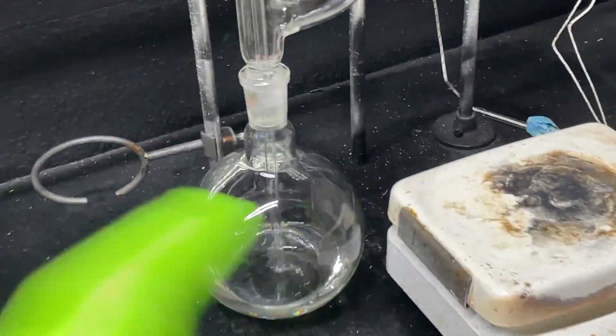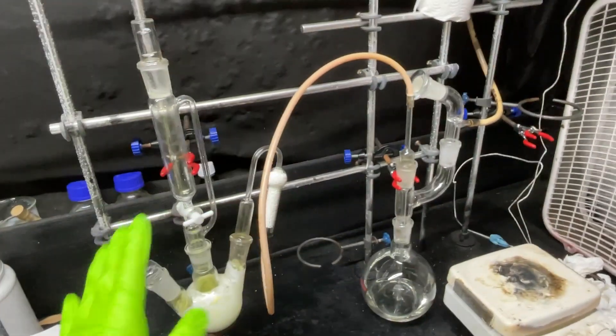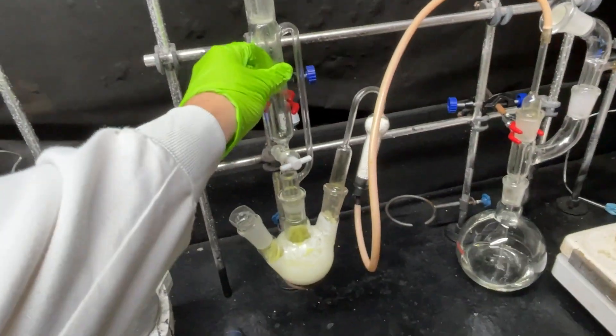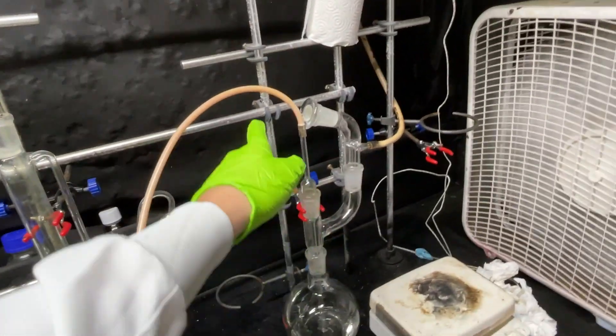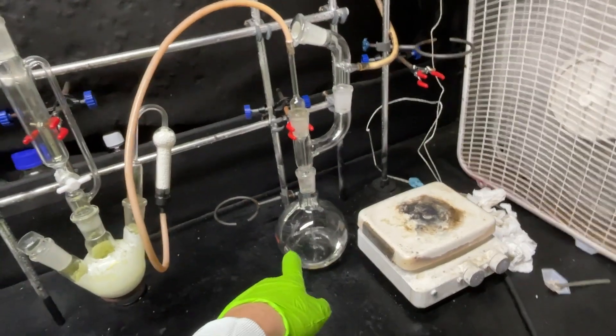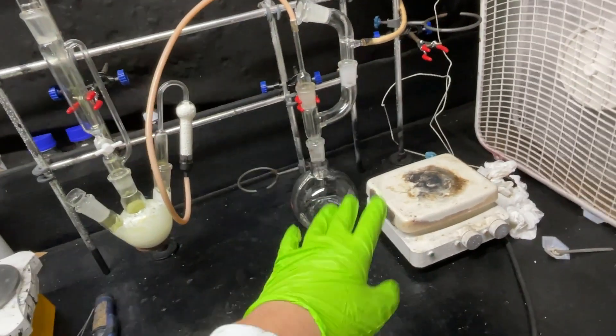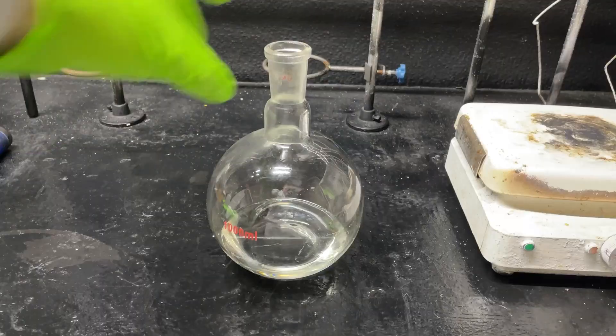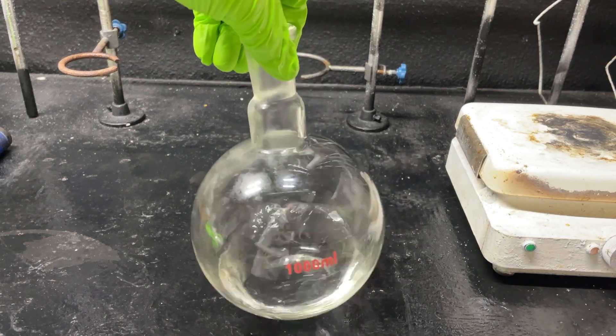And the fan has been keeping it cool so that's good. Anyway I'm going to disassemble this, get this chlorine generator out of here and out there and let it vent out. And then we will collect our product and hopefully my eyes don't absolutely burn to hell.